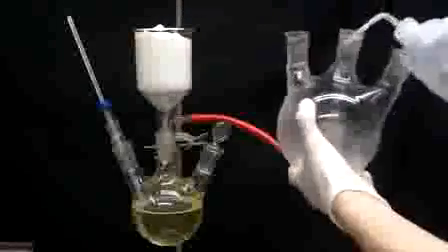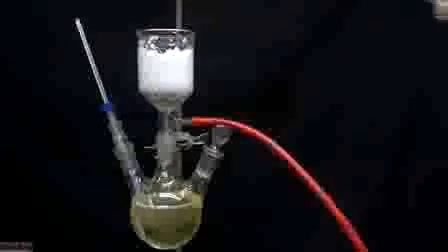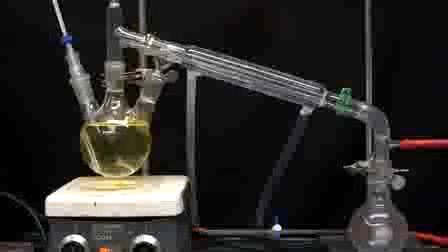Eventually we'll be done filtering things and we'll be left with a yellow solution containing our desired methylamine hydrochloride, and above it in the filter we'll have a lot of ammonium chloride. A lot of the ammonium chloride in this reaction doesn't react, so what we're collecting here is a portion of what we added in the beginning. This ammonium chloride can be used directly for the production of more methylamine, or it can be recrystallized and used for any other application.